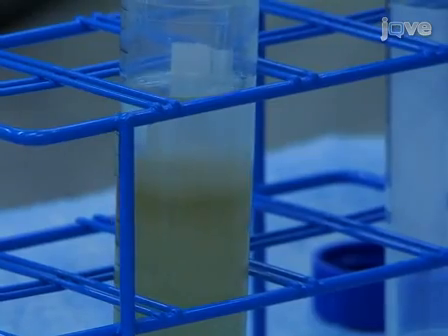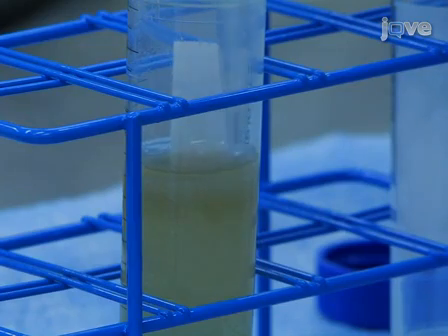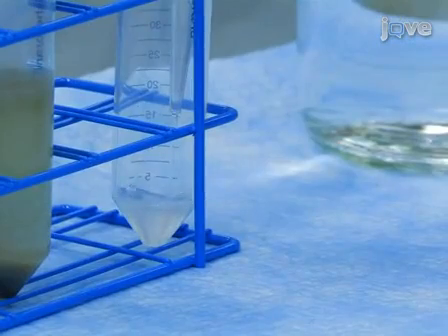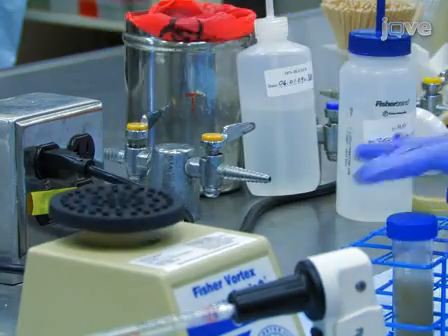water and interphase layers. It's very important to try to minimize the amount of the sucrose layer that is carried over while you're collecting the interphase layer. Transfer these layers to a new 50 ml conical centrifuge tube. Vortex the tube to mix the remaining sucrose fecal pellet solution.